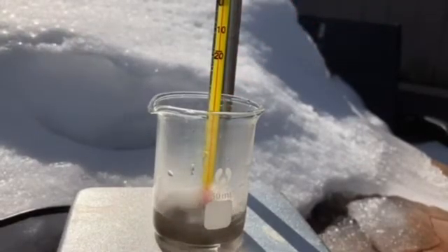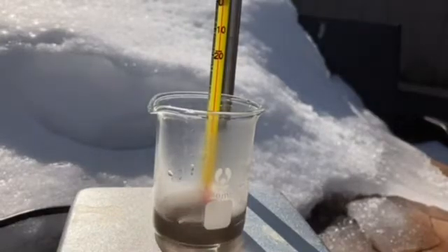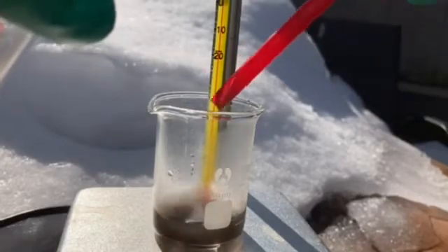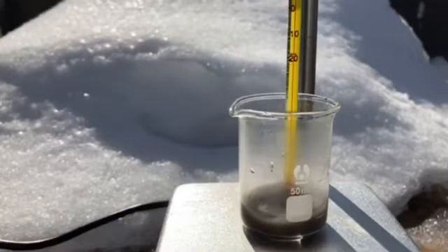If not, it can quickly lead to a loss of yield, which we do not want. We can keep slowly adding the rest, but we still have to maintain the pH of between 9 and 9.5 — in my case it was around 9 — and keep the temperature at 45 degrees Celsius. Every 5 minutes or so, we should check the pH to see if it's at that level.